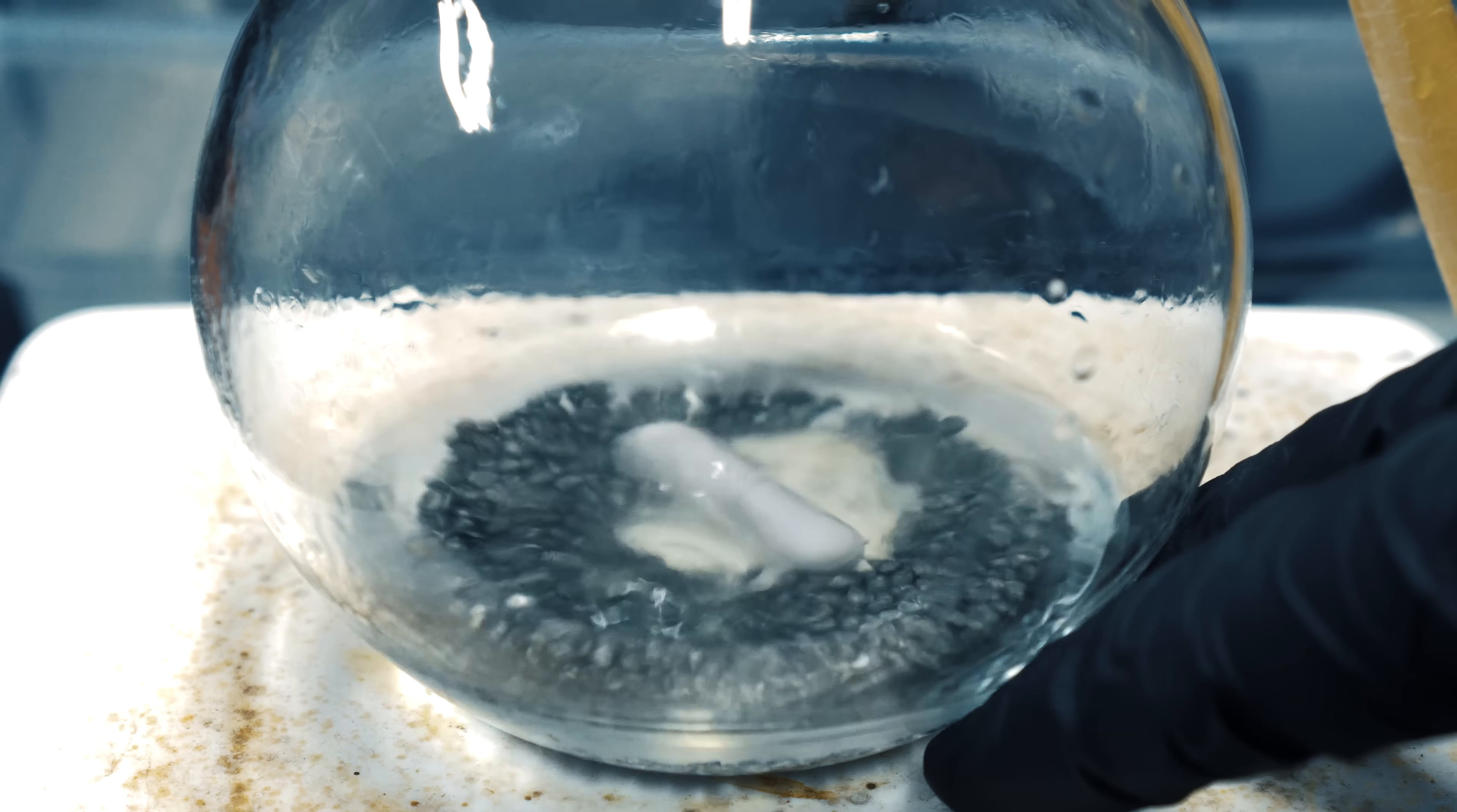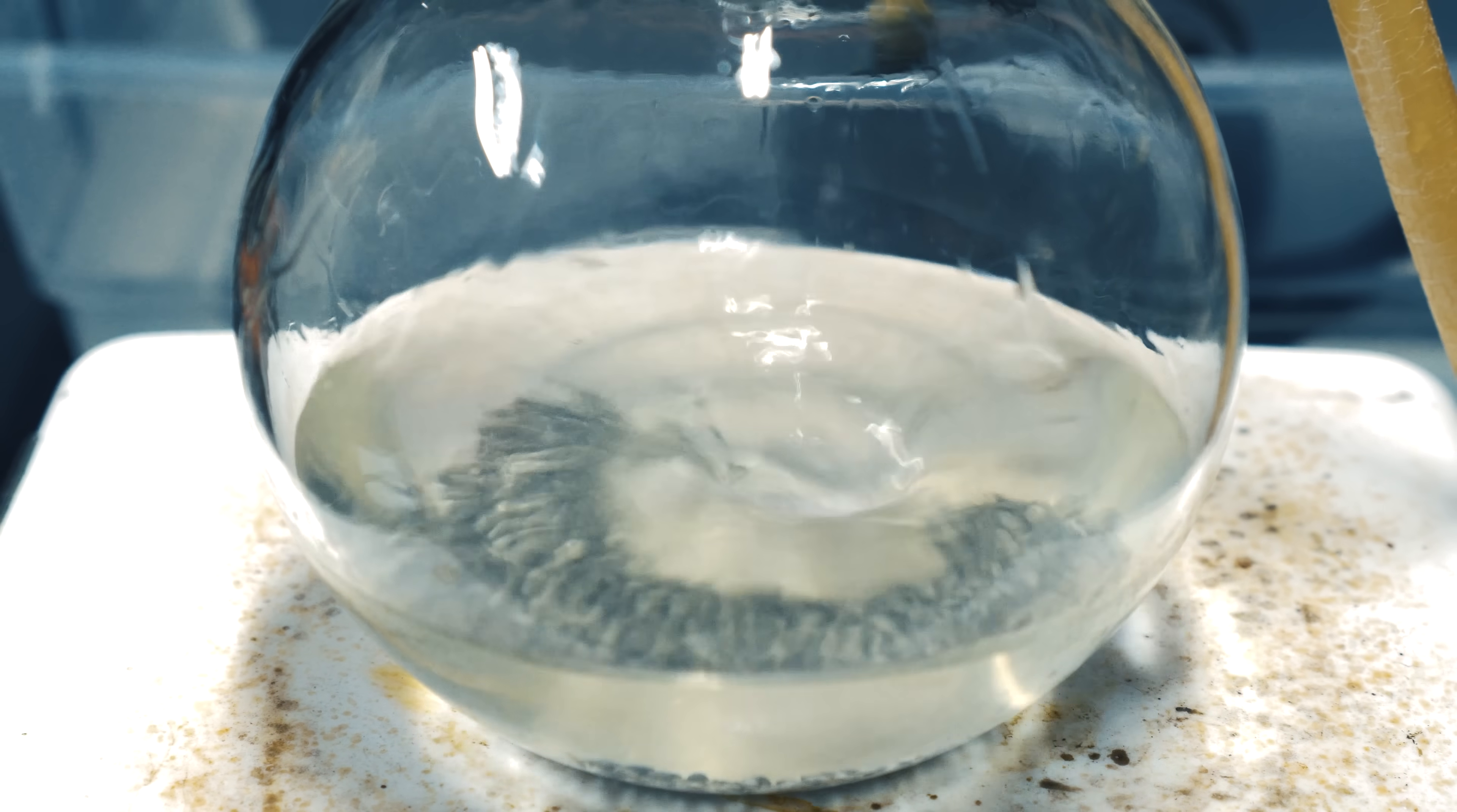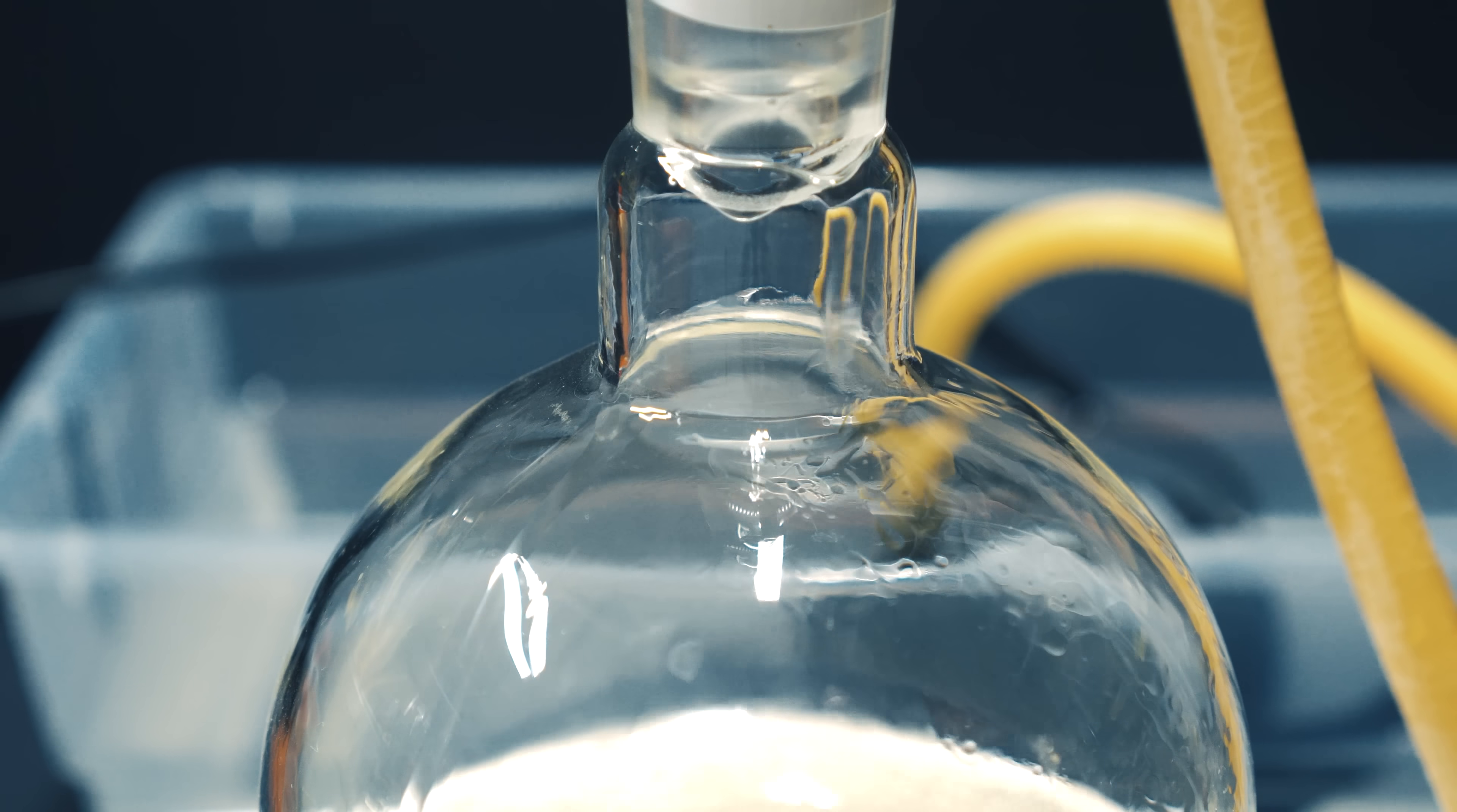As more and more acid was added, the reaction mixture actually got quite hot, and it actually started refluxing by itself. The solution also turned yellow, and it was looking a little bit more opaque. This was really cool to me, as I never got to do this reaction in my class, and it was really cool to see it in person.